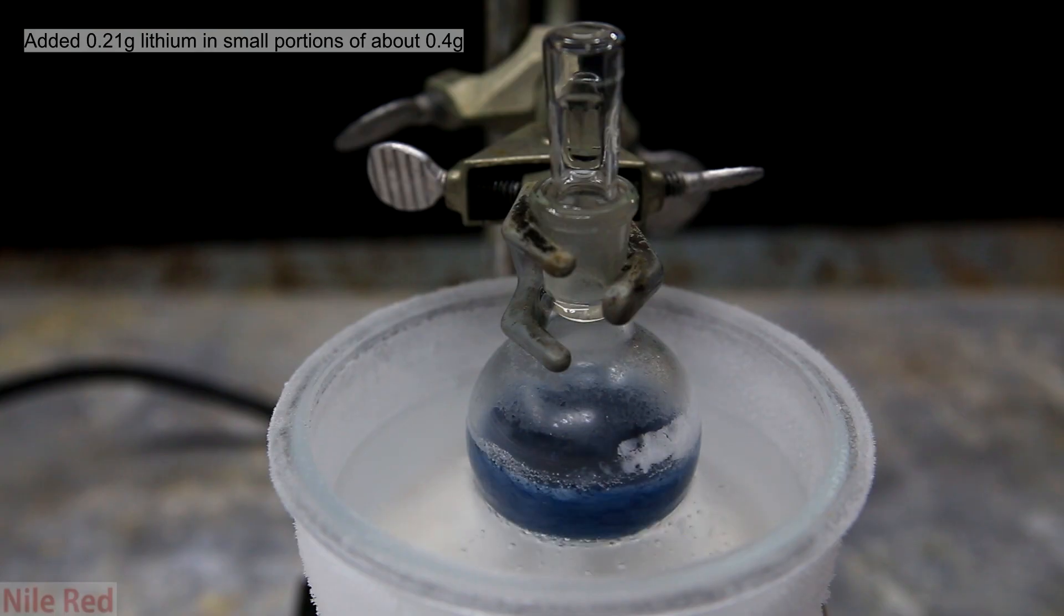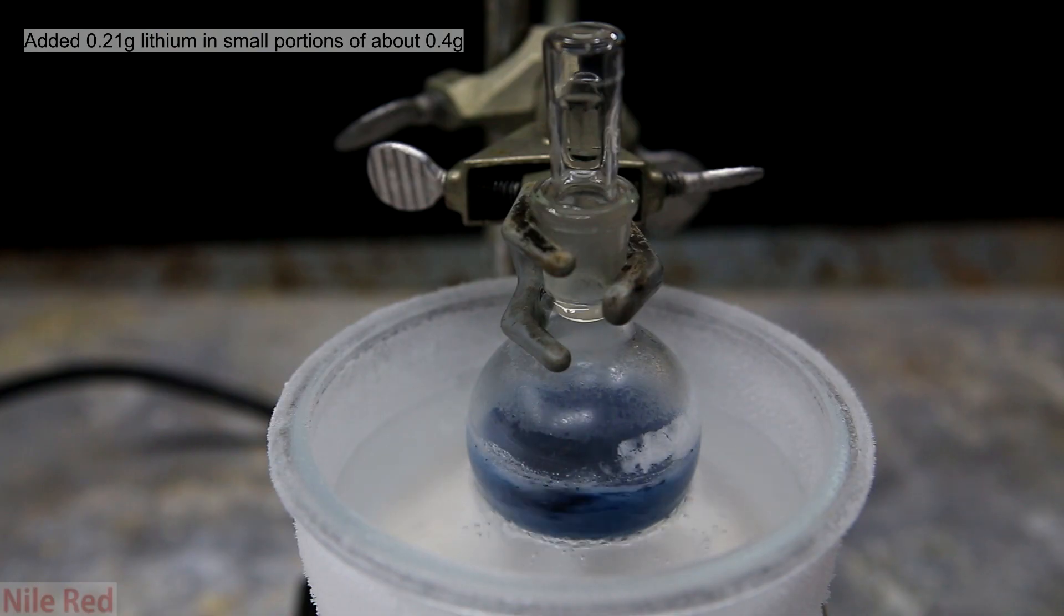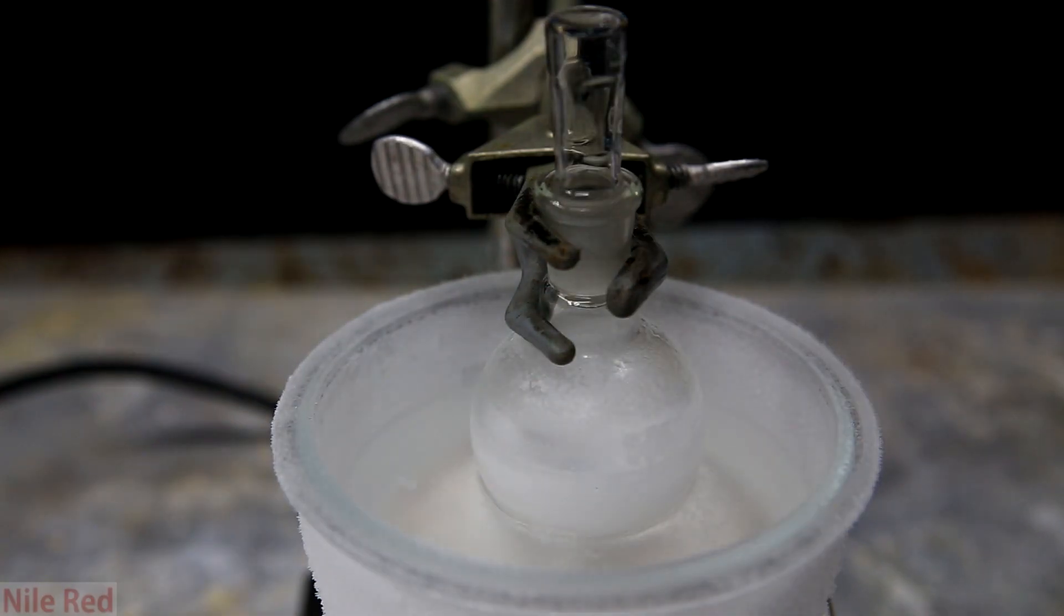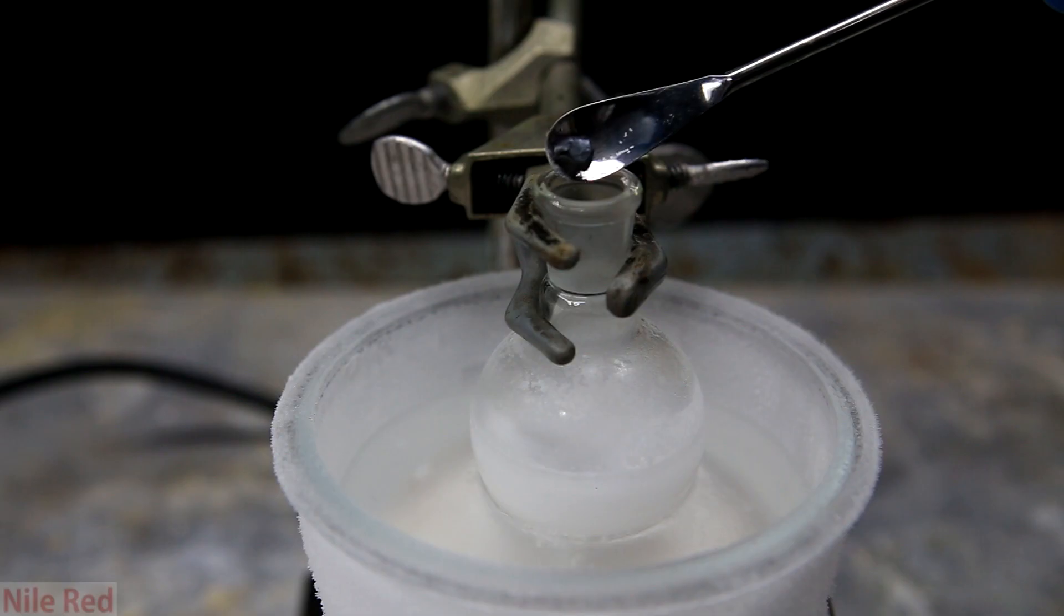Without going into any real detail, the color is due to solvated electrons when the lithium dissolves into the ammonia. The blue color will slowly fade until it becomes white again.